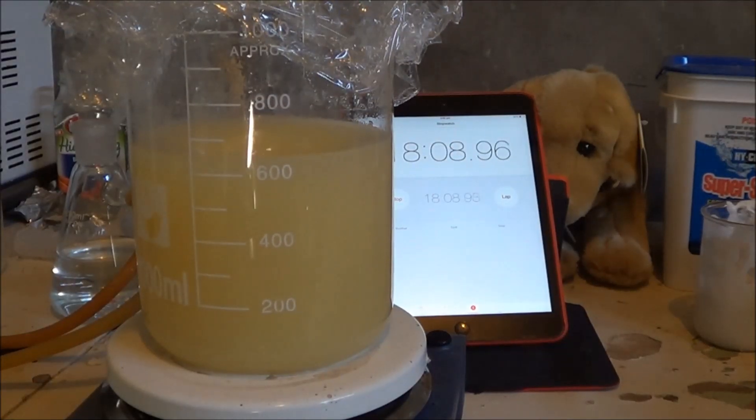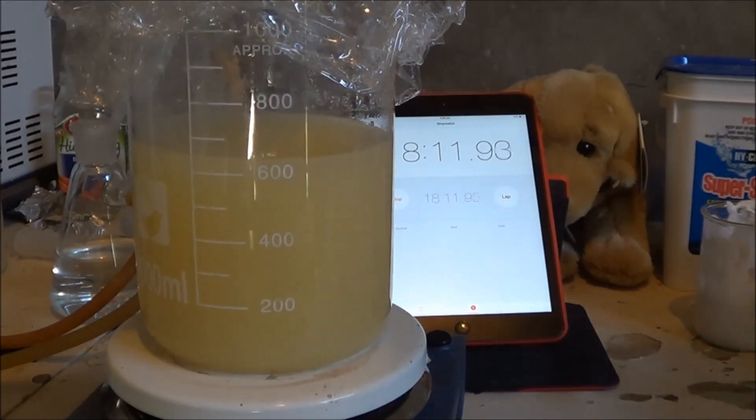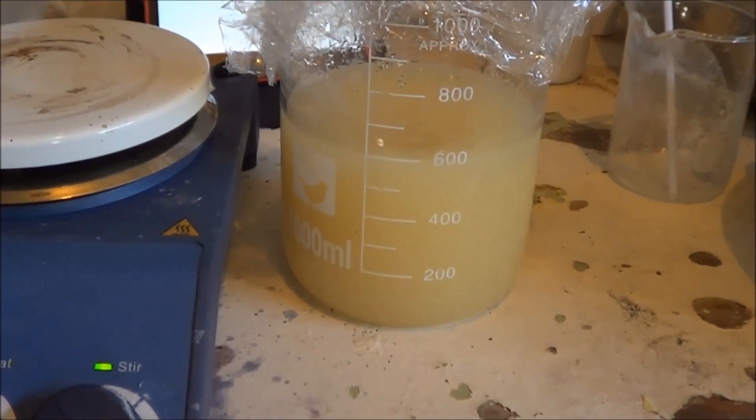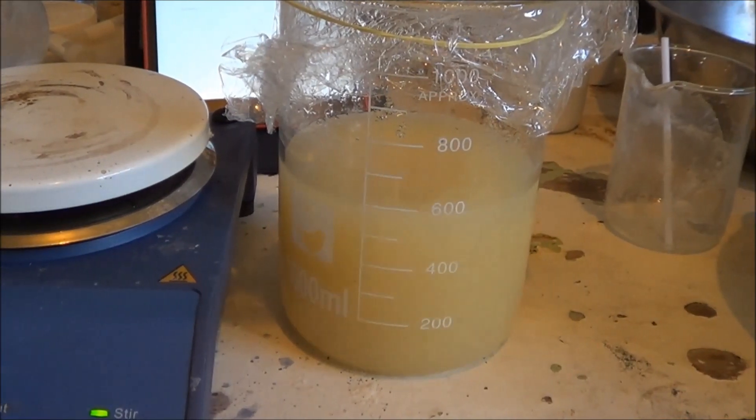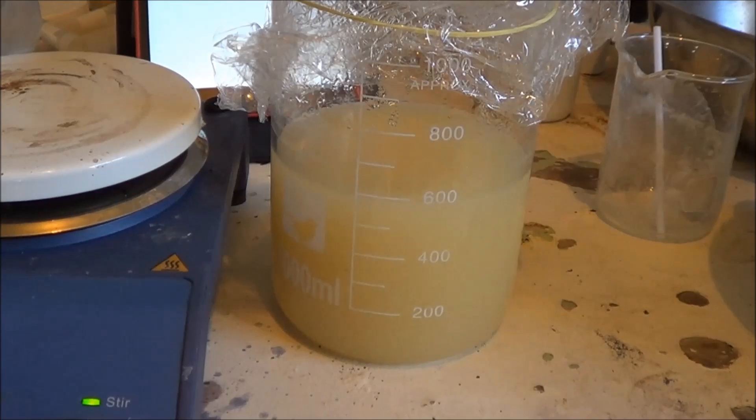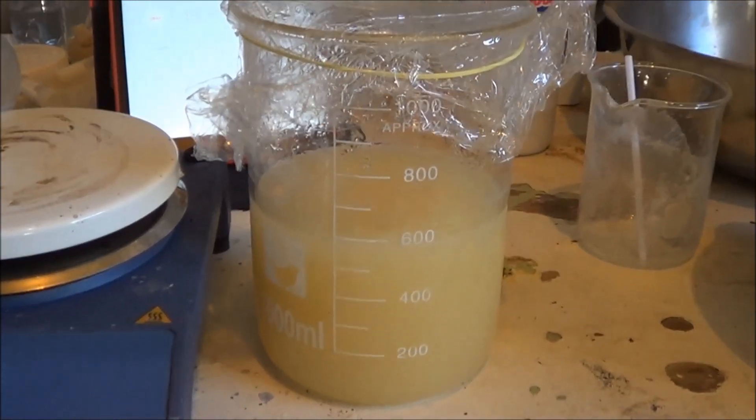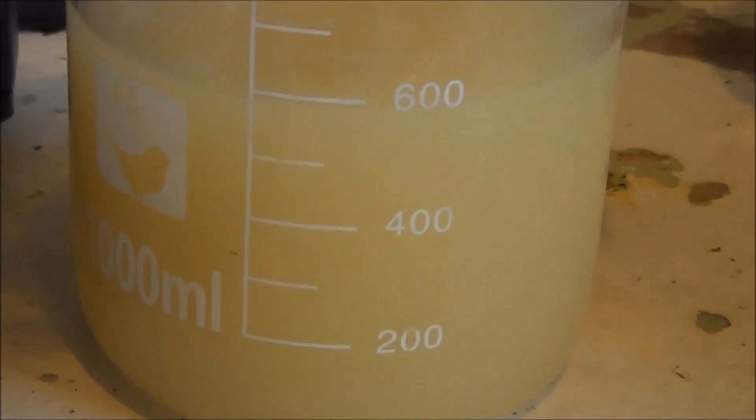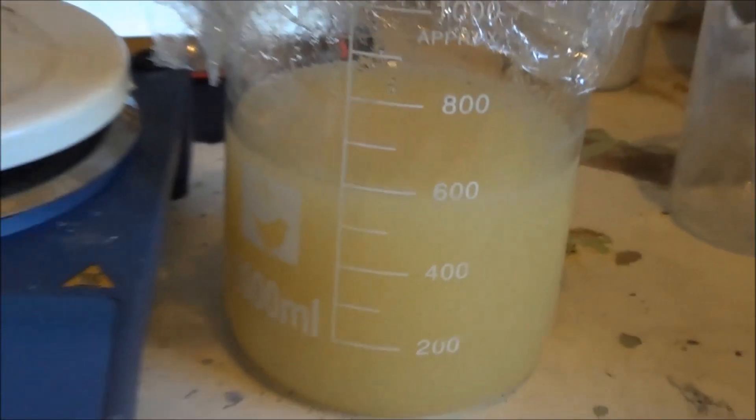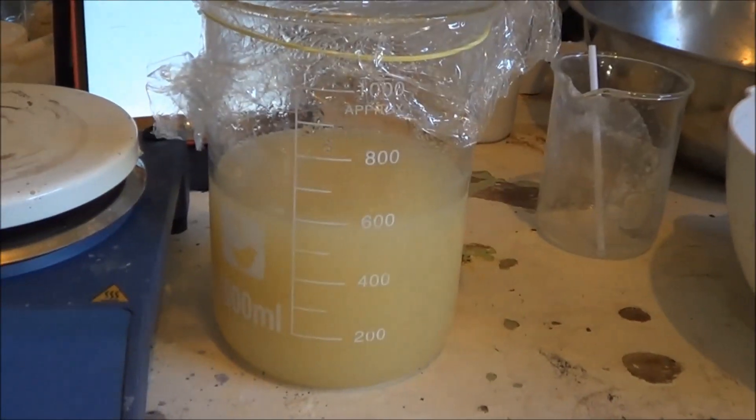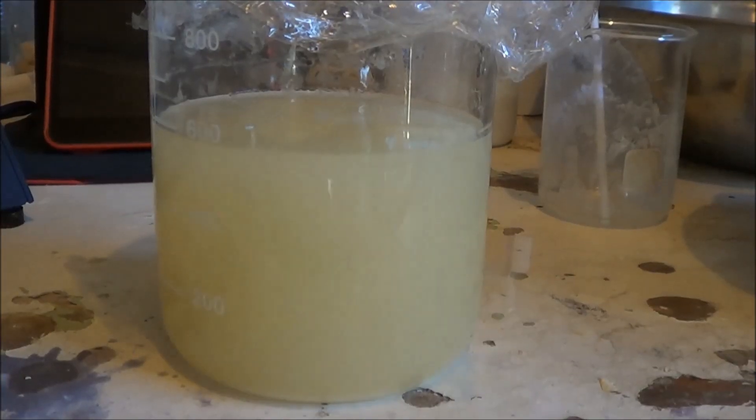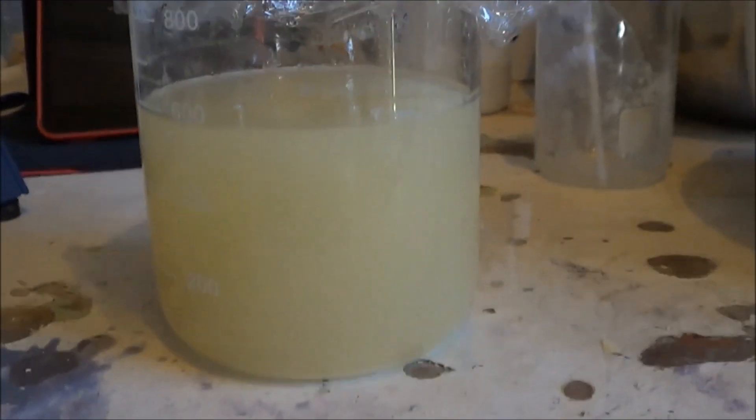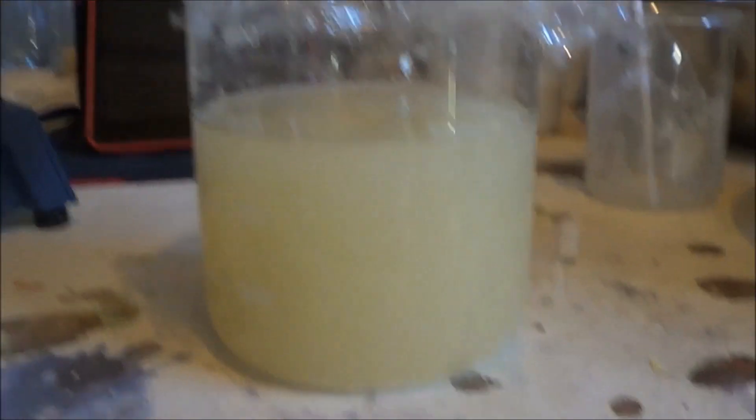Okay, so it's been over 18 minutes now, and I reckon we're going to take this off the heat. The end point is a little hard to see, but usually it goes from the bleach color, and then it goes to an orange, and then it goes to a light yellow. It's harder to see because of the turbidity, thanks to the calcium carbonate impurities from our homemade bleach, but I reckon that's about done. Hydrazine is quite reactive, and especially while hot. So, contact with the air will destroy this solution of hydrazine here when it's in this free-based form.